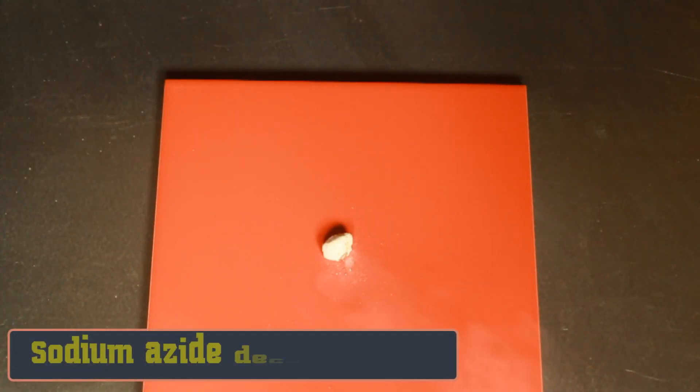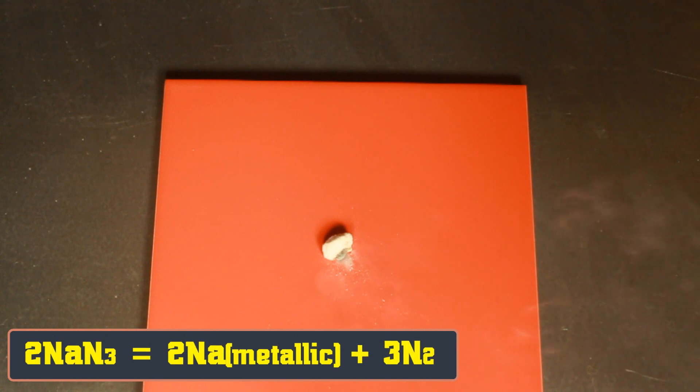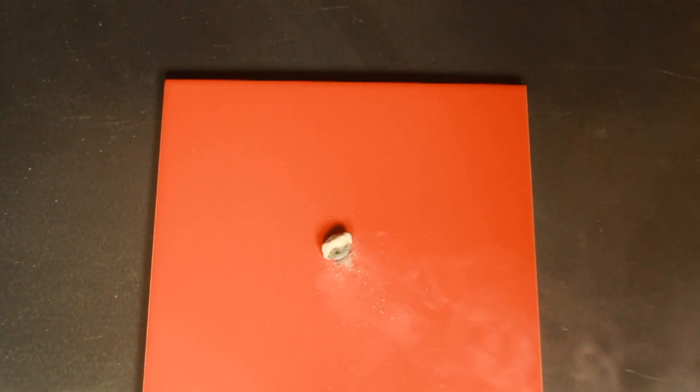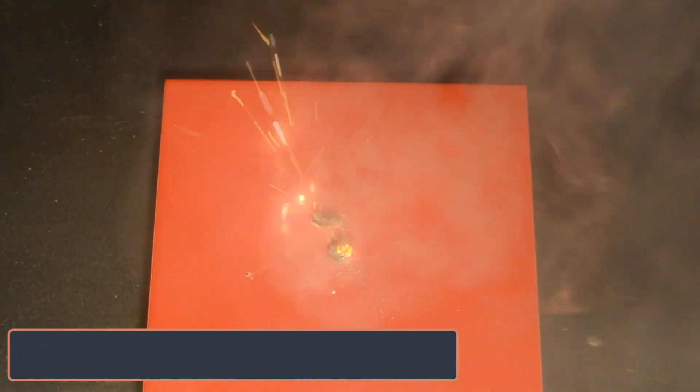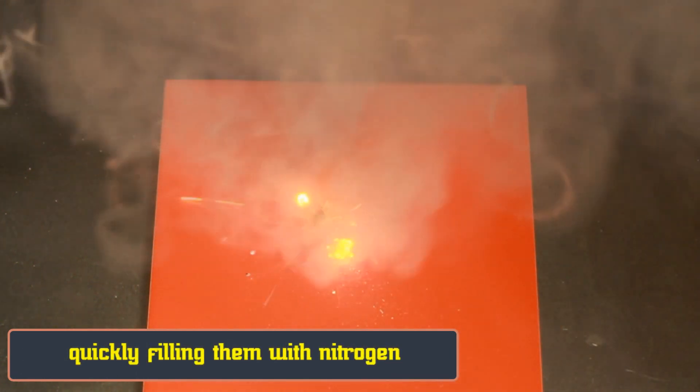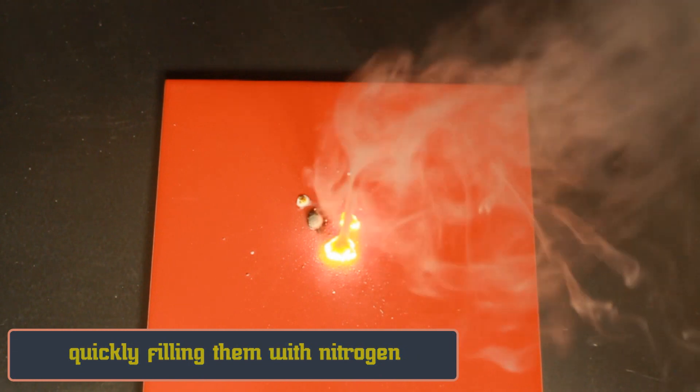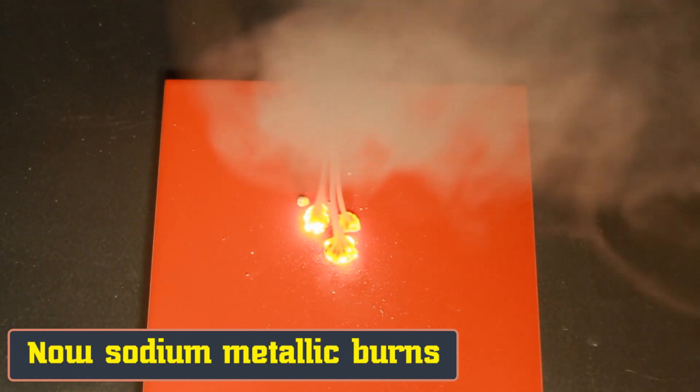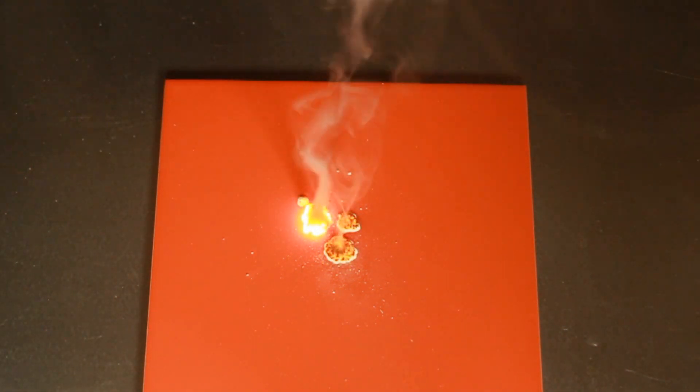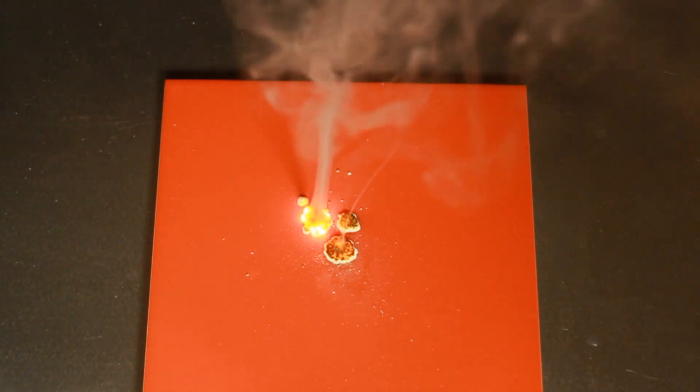Right now you can see it on an example with sodium azide. Let's look at this reaction closer and see how the metallic sodium forms.